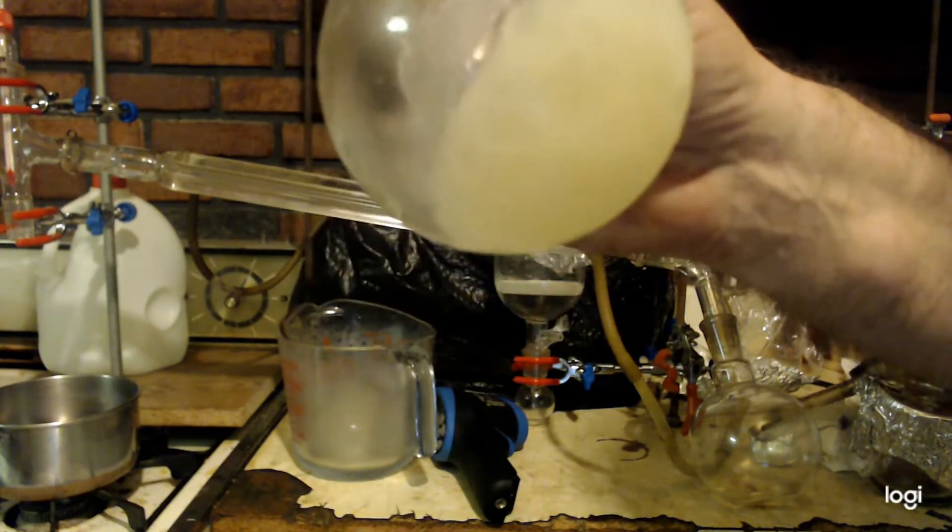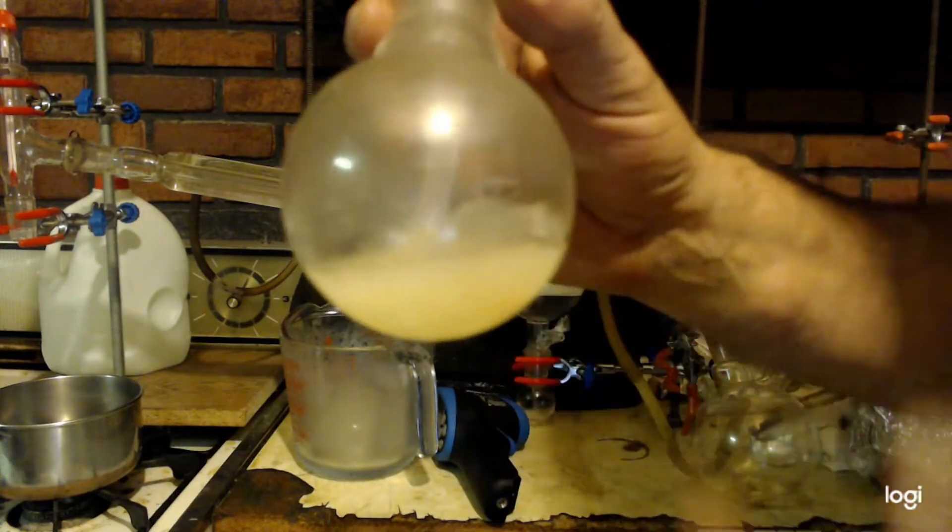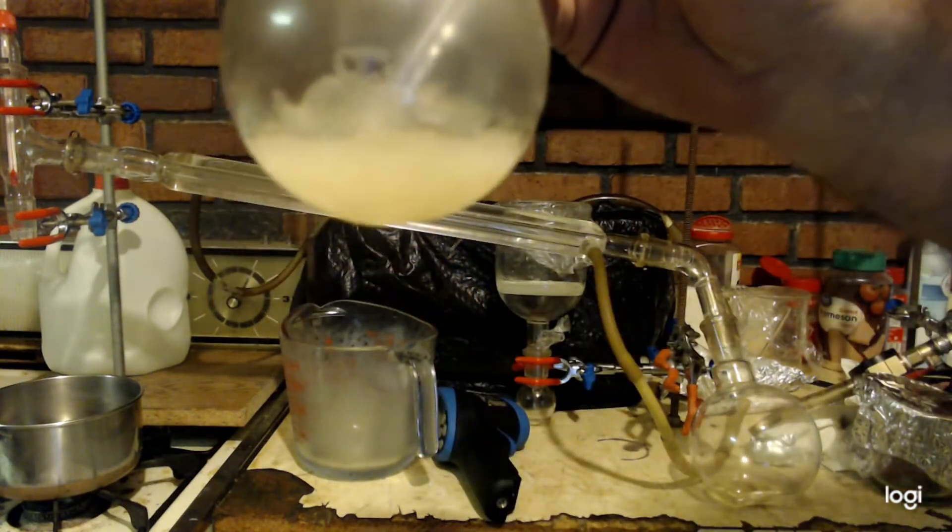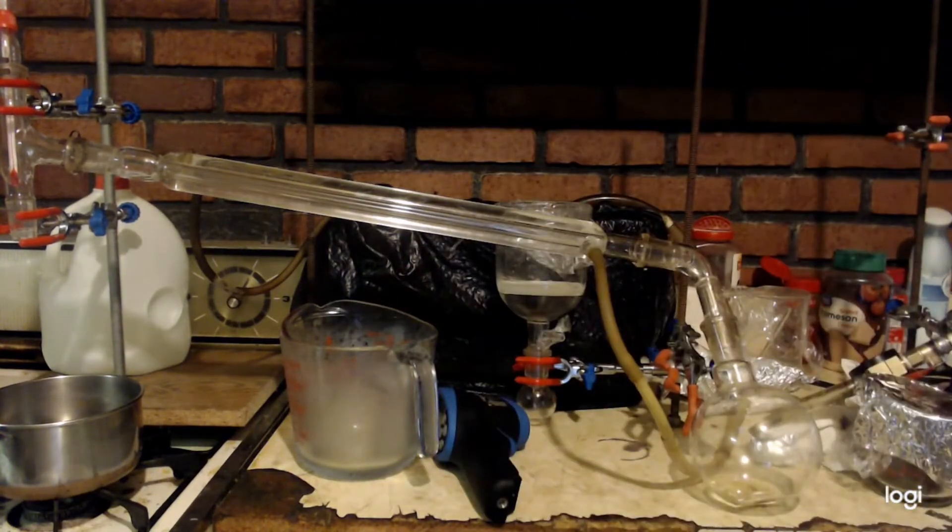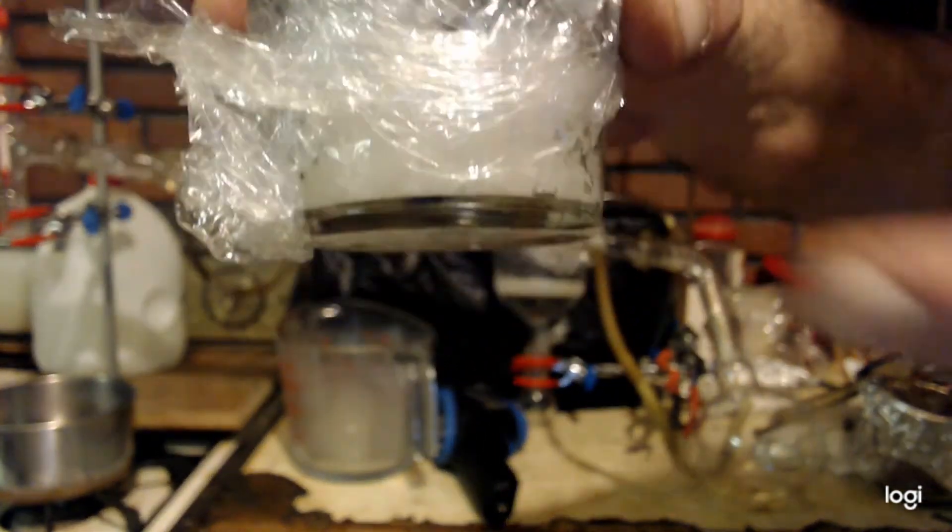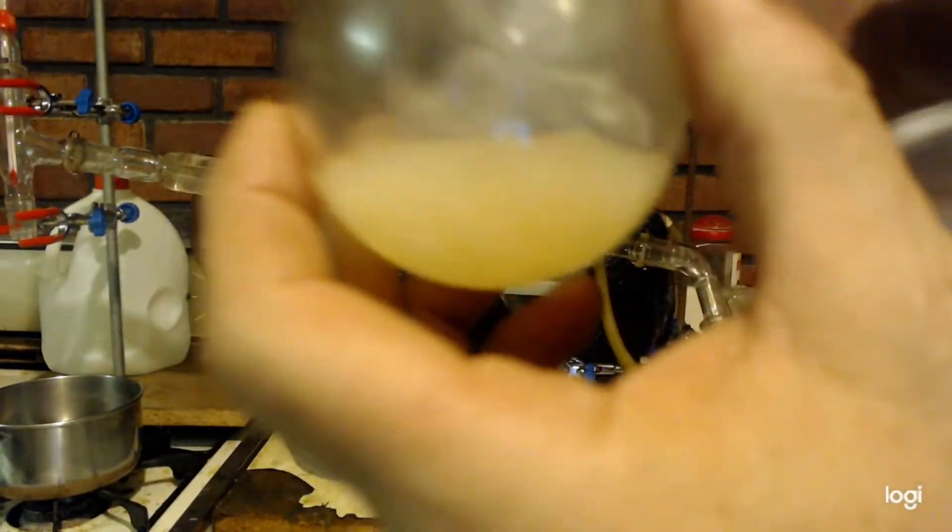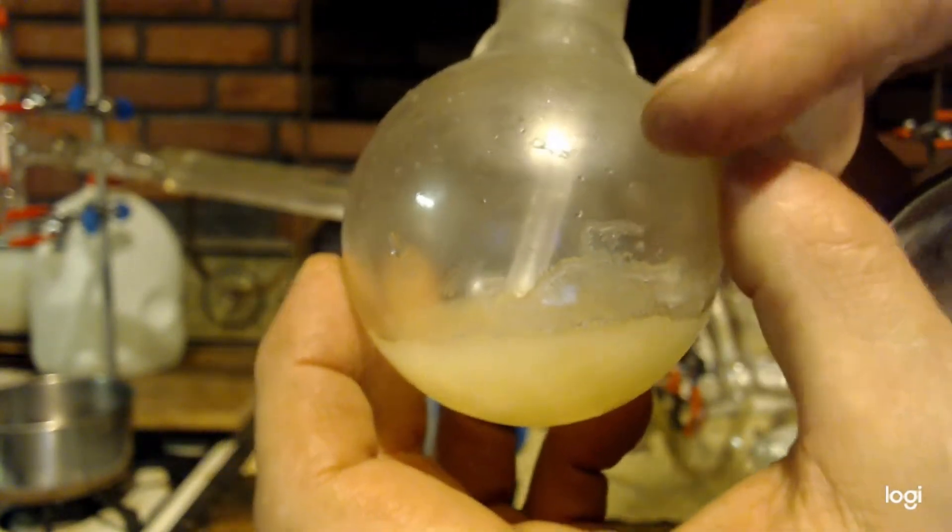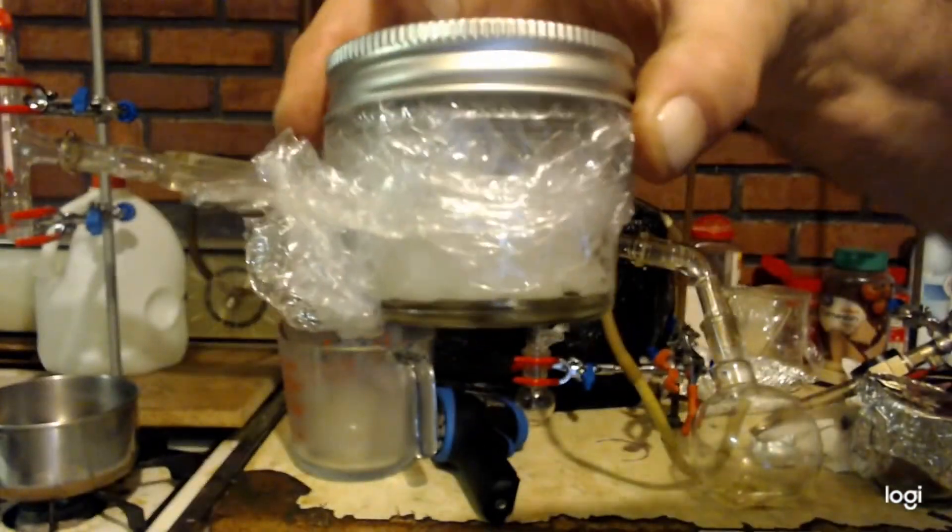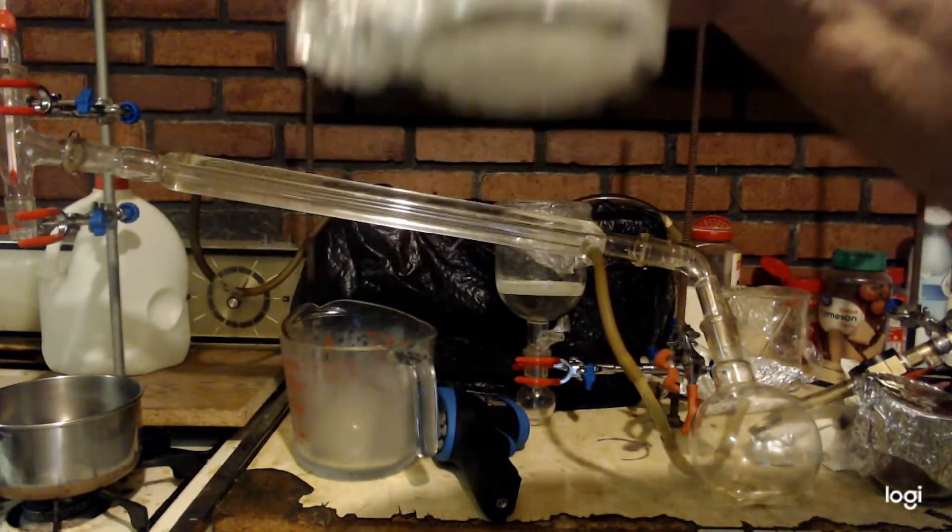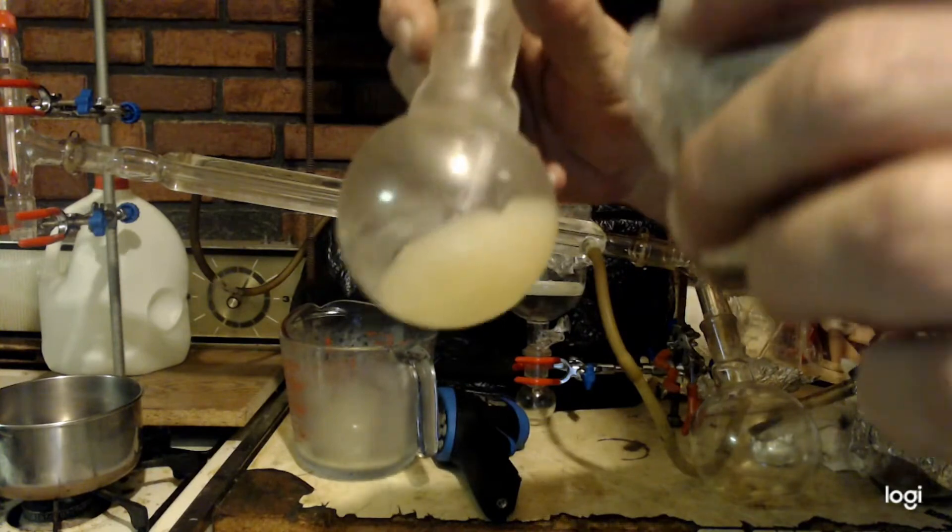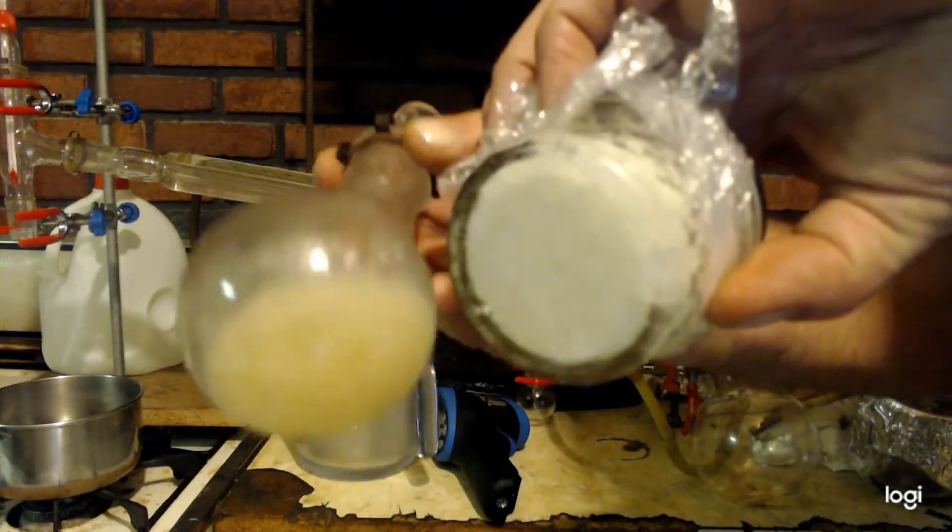You can see that's probably equal to the amount of water in the other crystals. This weighed 40 grams but it was wet. If we count the water here but don't count the stuff in this round bottom flask, they kind of cancel each other out. So I'm saying my yield was 40 grams, which is a lot better than I thought - I was shooting for 34. There's at least 40 grams worth of stuff in here. Look how white this is compared to that.